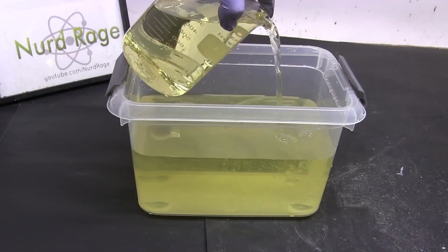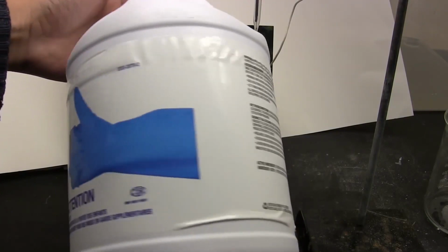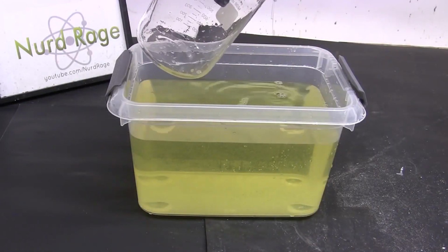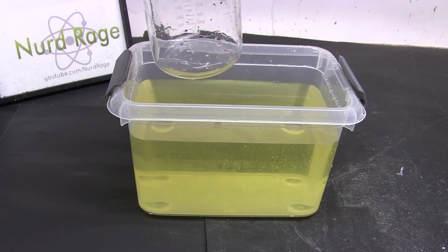So here is the aqueous solution of the various products from the reaction of a full 1 gallon bottle of 8% sodium hypochlorite bleach and 93 milliliters of methyl ethyl ketone. The yellow color is from the various reaction side products, as I used excess methyl ethyl ketone rather than perfectly titrate the bleach to determine how much I needed.